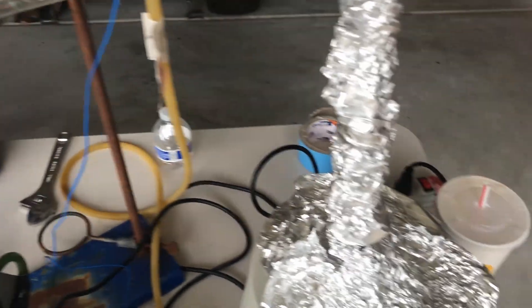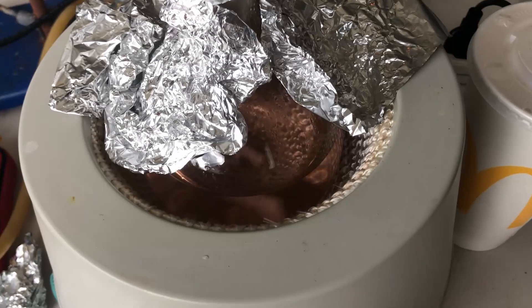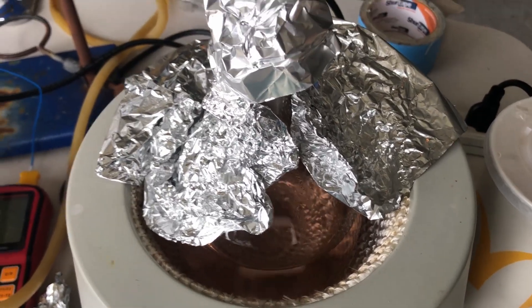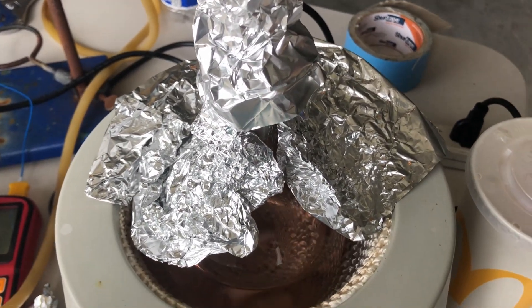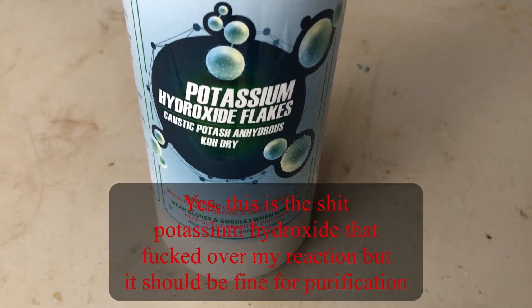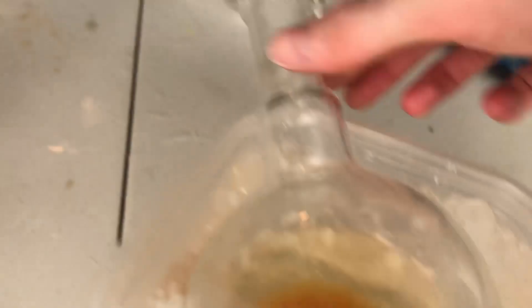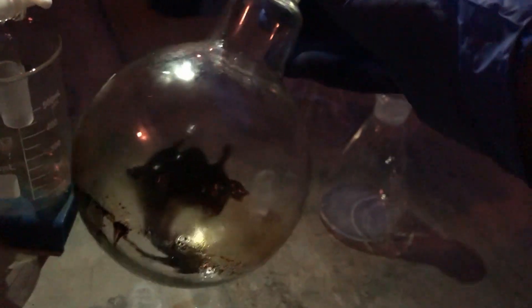To sum up purification, I just redistill it to get both water and acetaldehyde out, while getting mostly the dioxane-water azeotrope. Then to purify it further, I put in a bunch of potassium hydroxide, which polymerizes everything else that's not dioxane and pulls the water out — so it has a double purpose. Once it's all pulled out — so that's like a day or two later — I use a separatory funnel to separate the water layer from the dioxane layer.